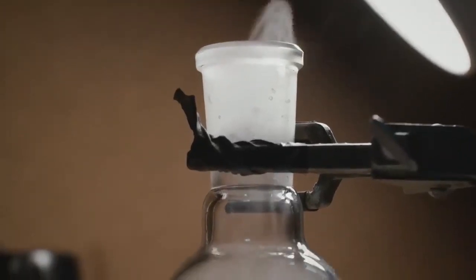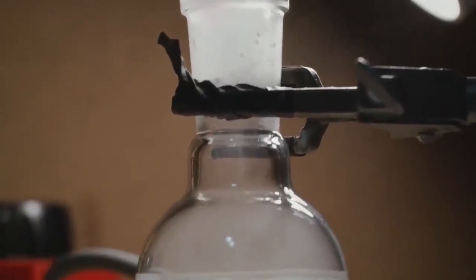It's a nice shape there. It's almost like meditative just to watch the stirring reaction. It's great.